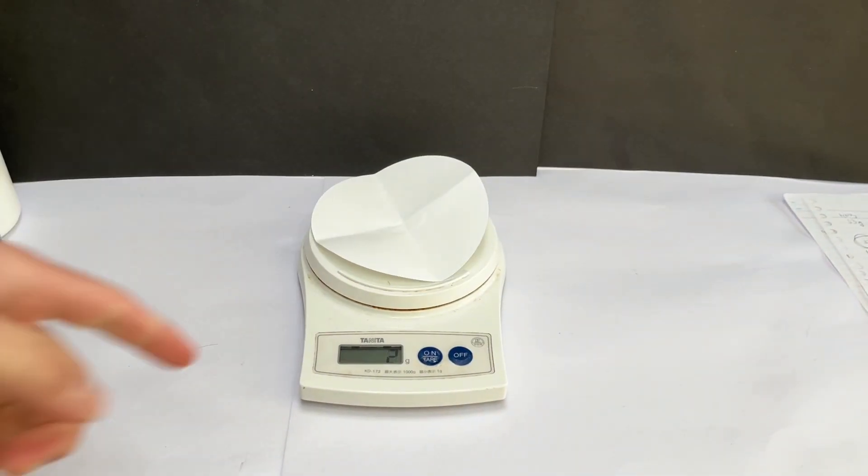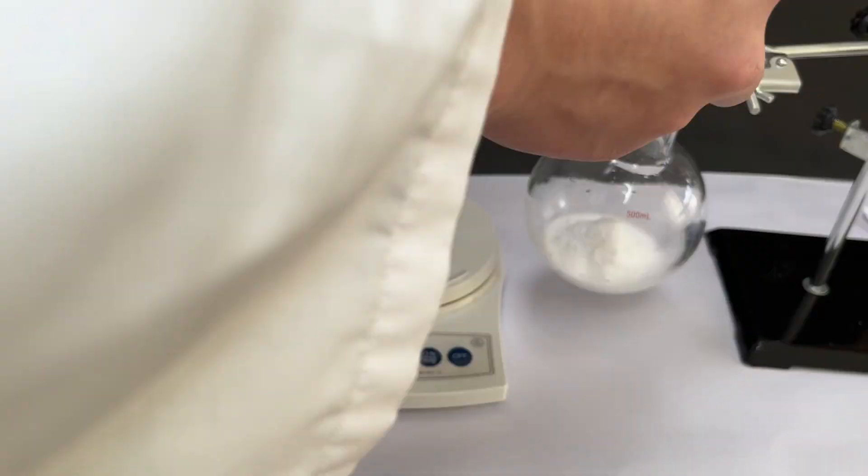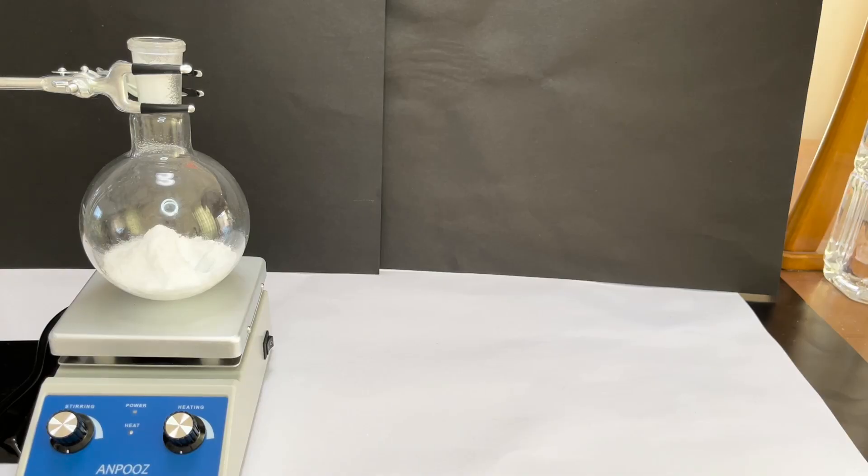Let's begin the experiment. First, I have to measure ammonium nitrate and sulfuric acid. Next, I have to build a distillation cooler.